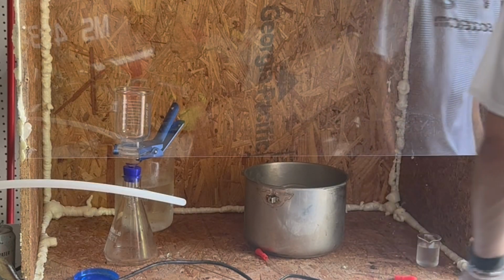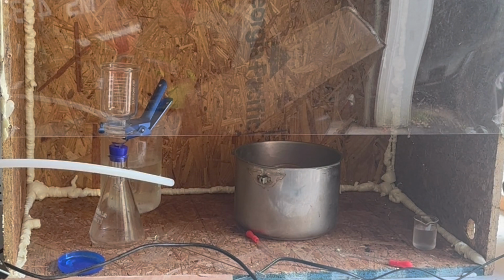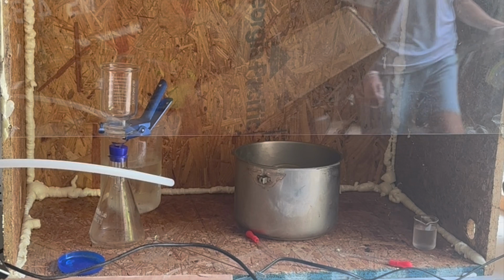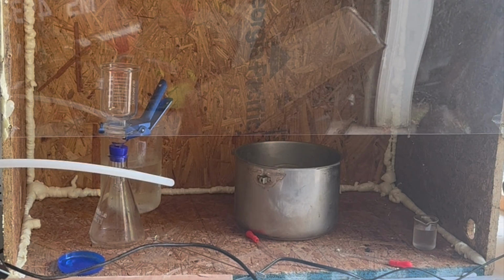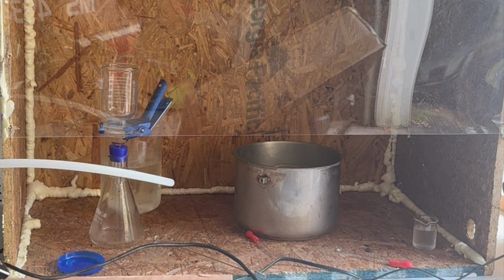Thinking this seems like something I should have discovered. It's producing the iodine gas, and it's not producing a precipitate. Obviously, it's producing some precipitate because the solution is purple. However, I don't like losing it to the gas.